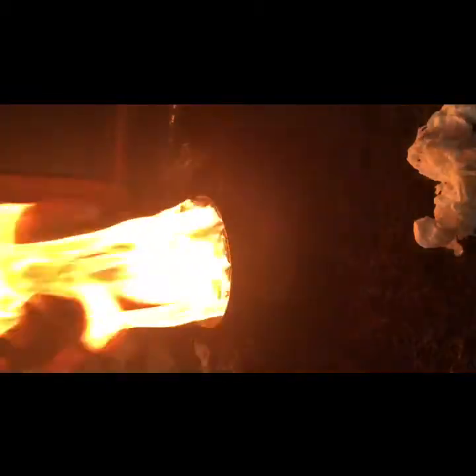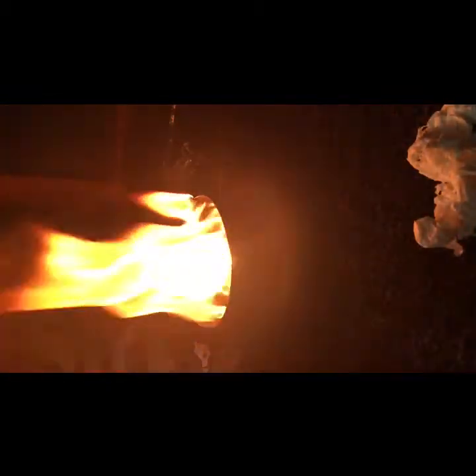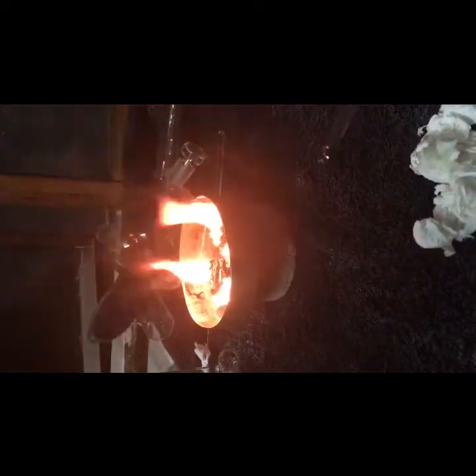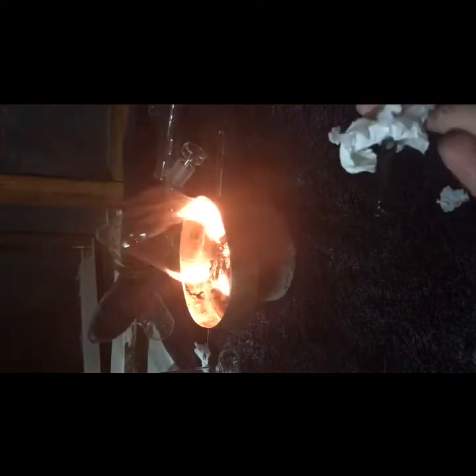The green nitrile gloves — the industrial ones they give to workers — do react with it, but not as violently as the thin nitrile gloves, the normal ones. It does react, but it seems to not go all the way through.